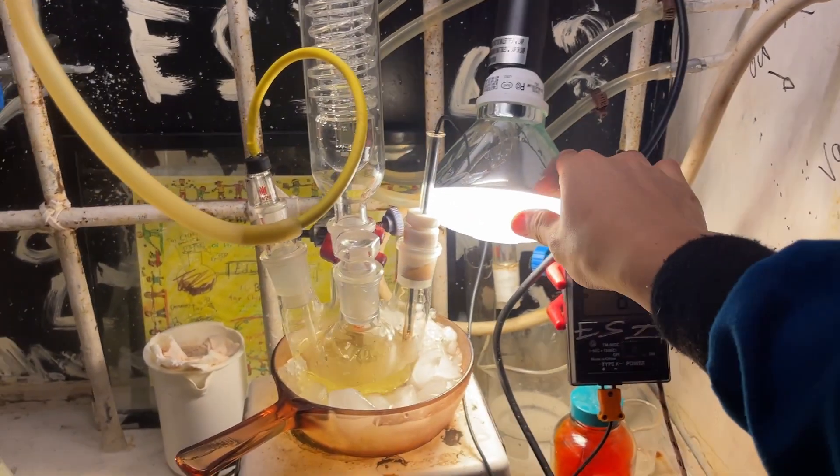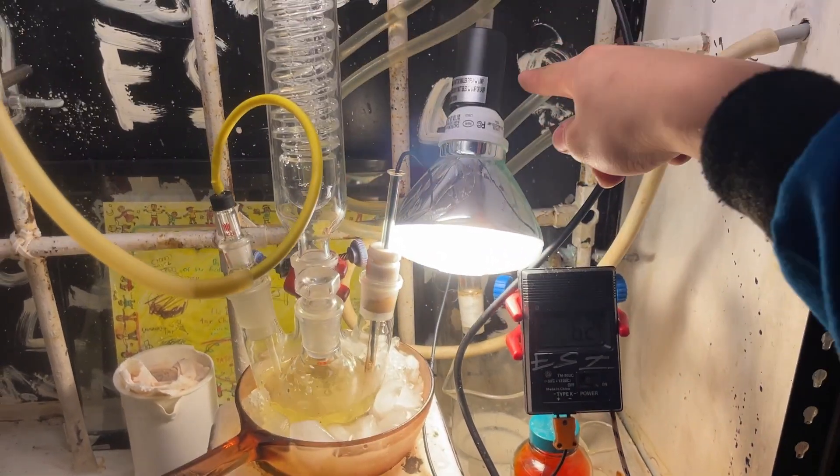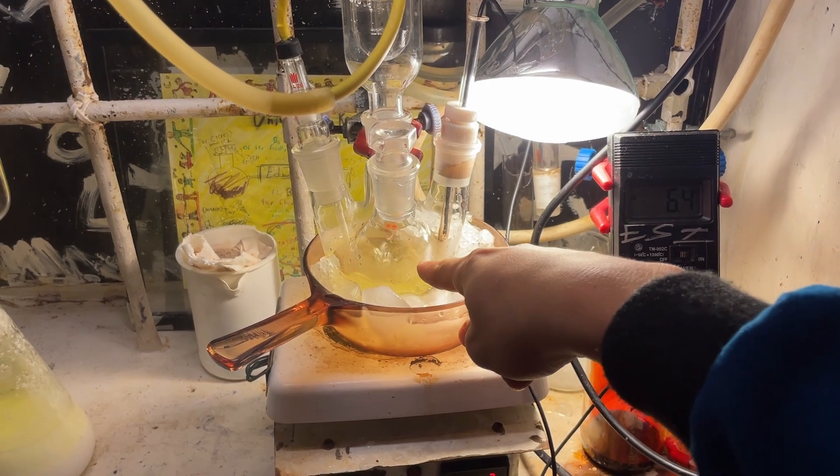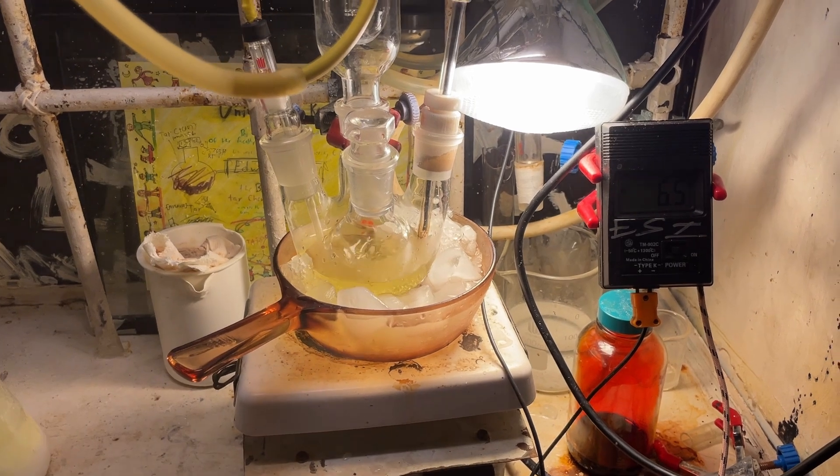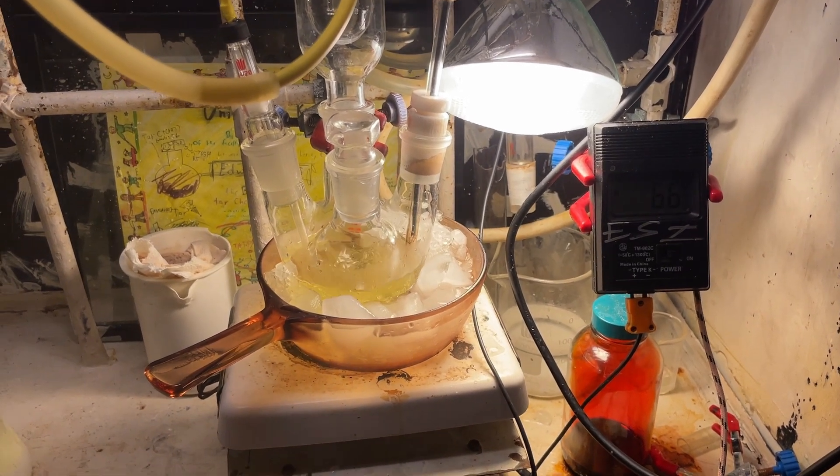Okay, I set up a fluorescent light to shine on this thing because it's gone far too yellow. And the temperature's increasing. The chlorine's going to react. And if I don't make it react with light, it's going to explode. So that's fun.